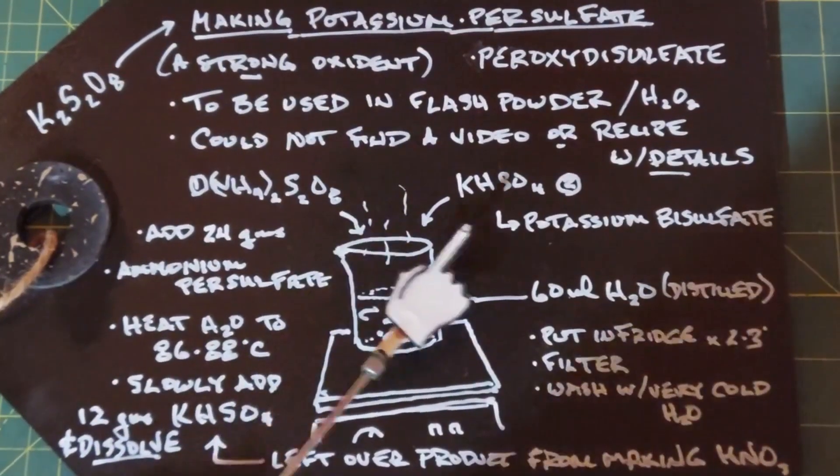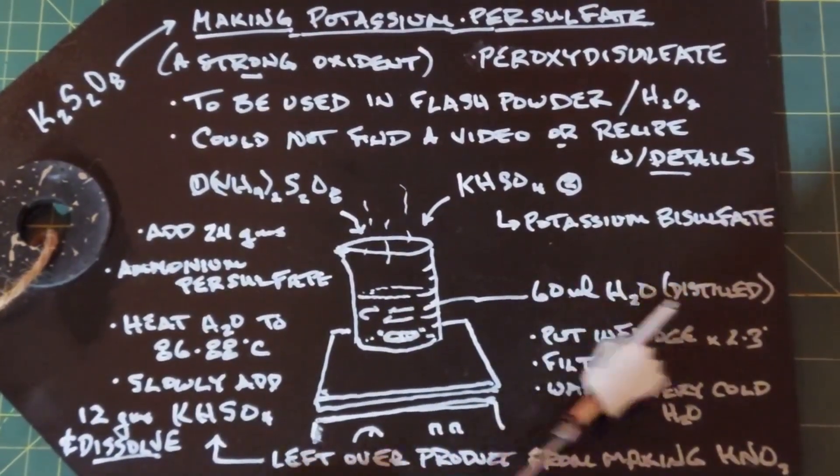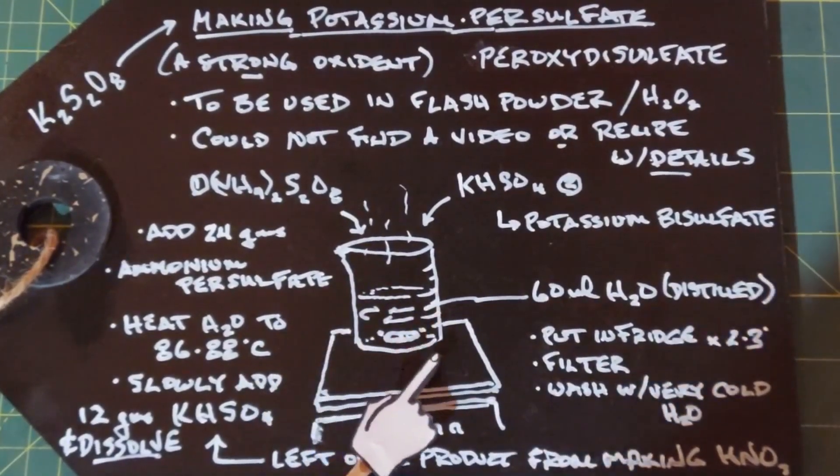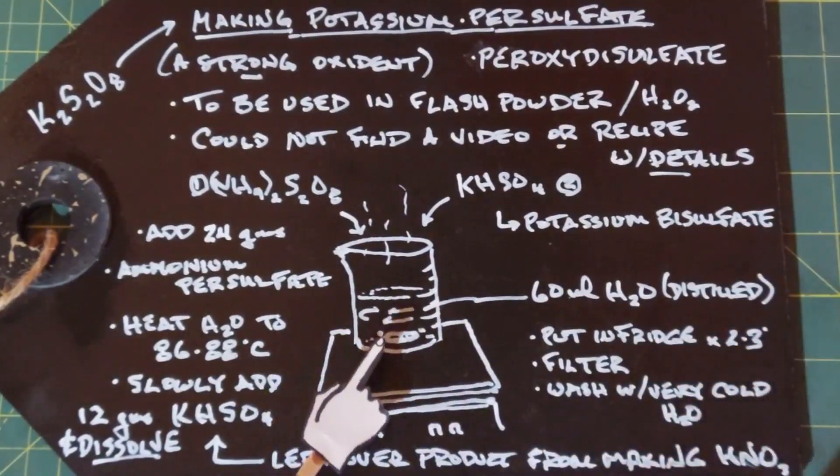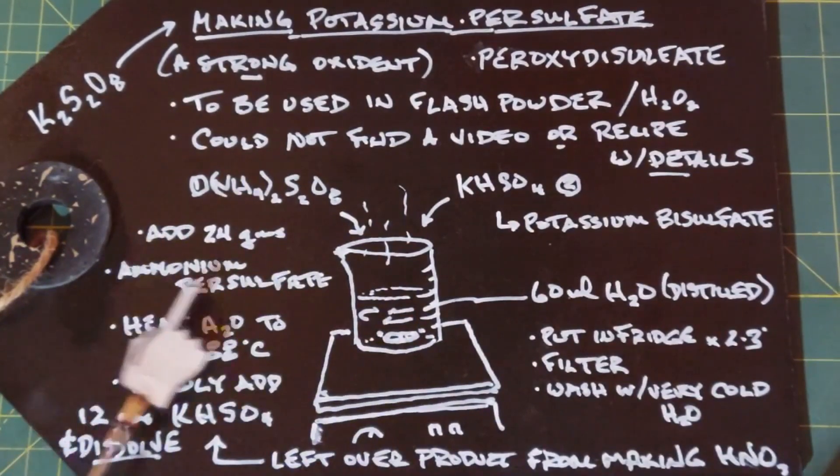I started with 60 milliliters of distilled water and put a stir bar in there and started to heat the water to put in the ammonium persulfate.